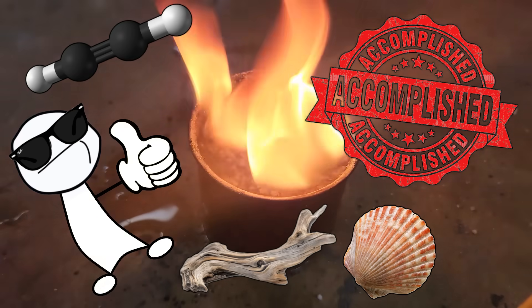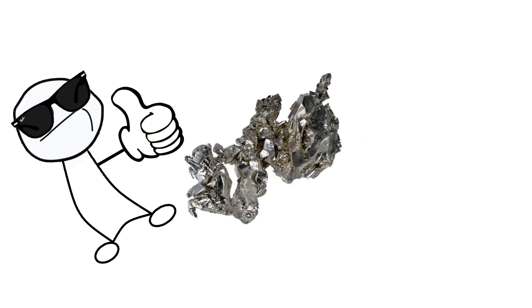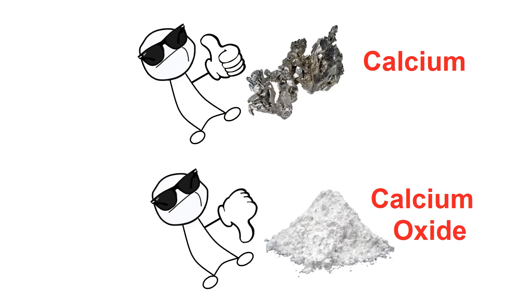This is certainly a viable process for making acetylene, but if you have access to elemental calcium, I'd recommend using that instead of calcium oxide to make the carbide, because the reaction can be done with a propane torch, which is obviously much, much easier.